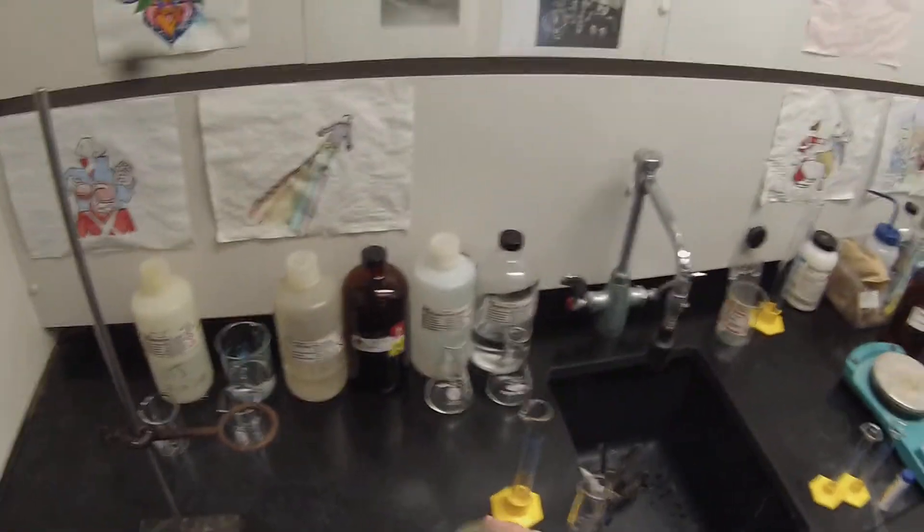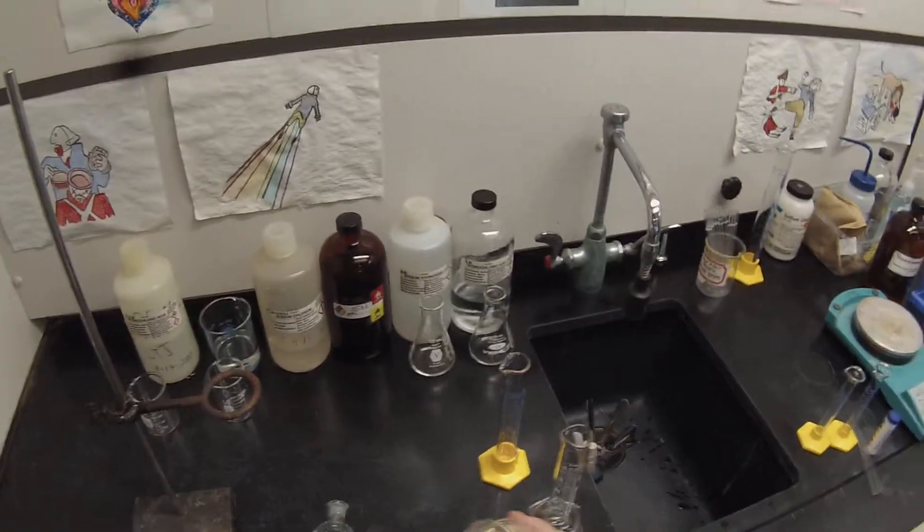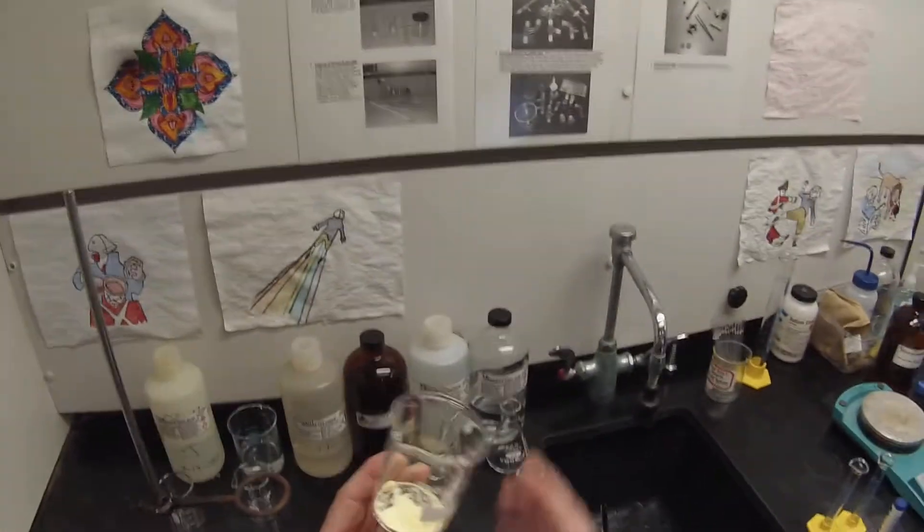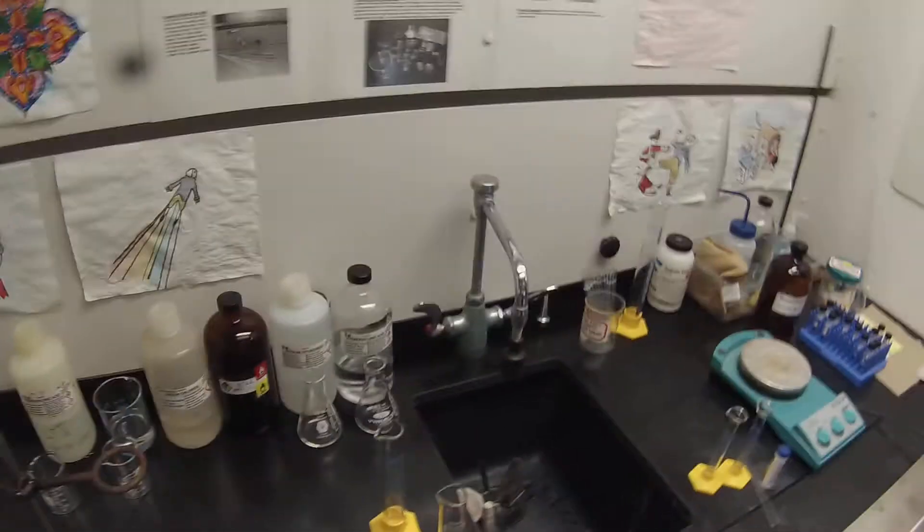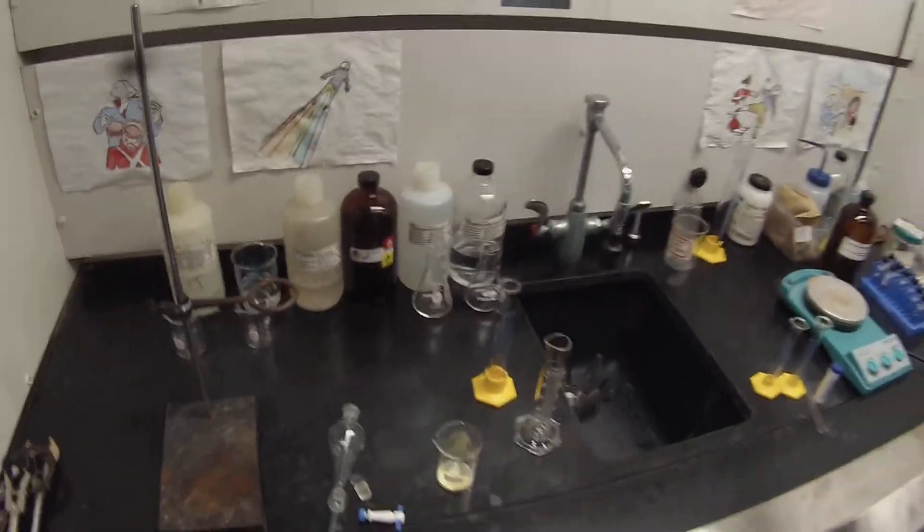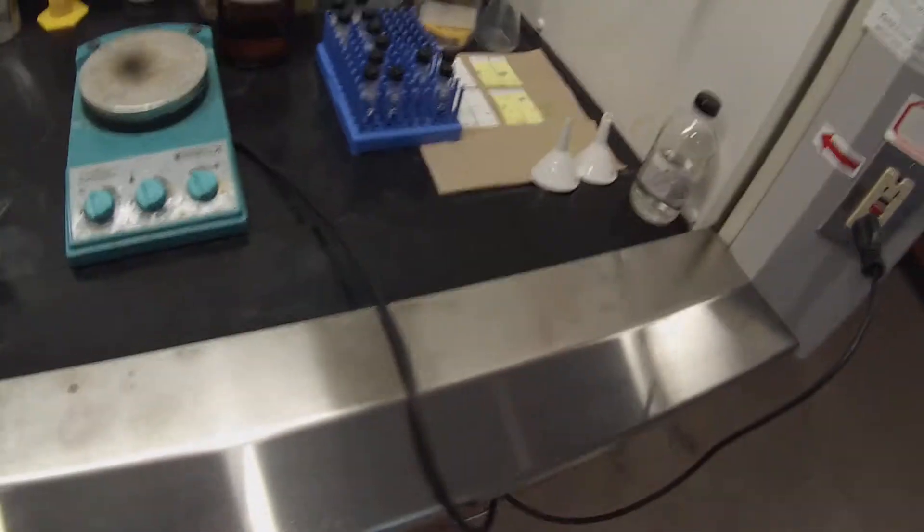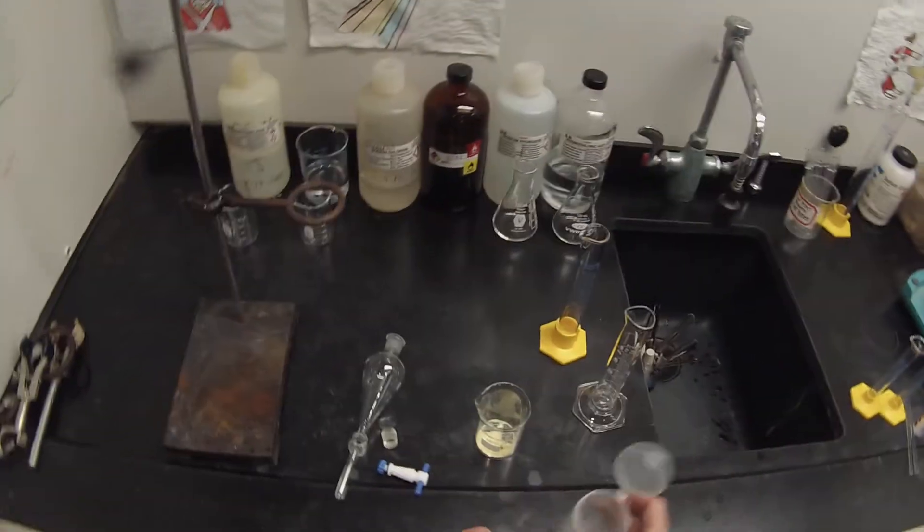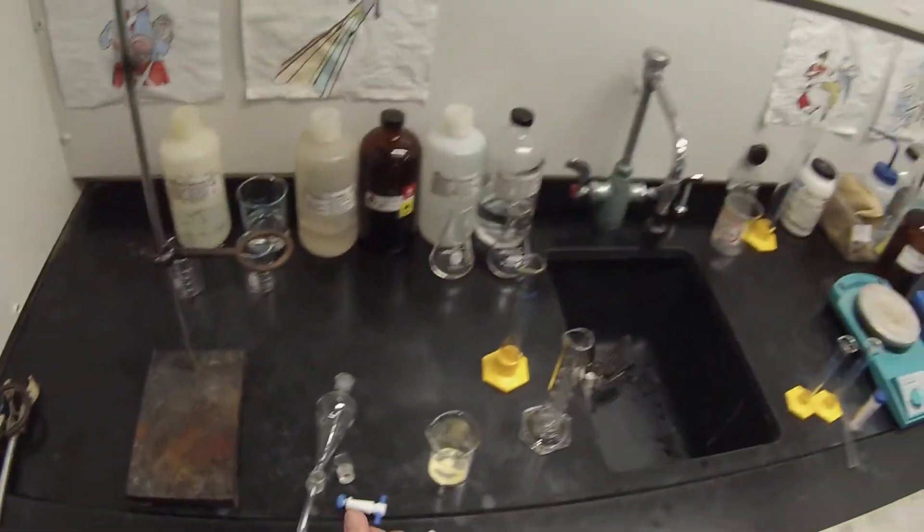I've already massed into the 100 milliliter beaker 753 milligrams of the equimolar mixture of tryptamine and vanillin and transcinnamic acid.